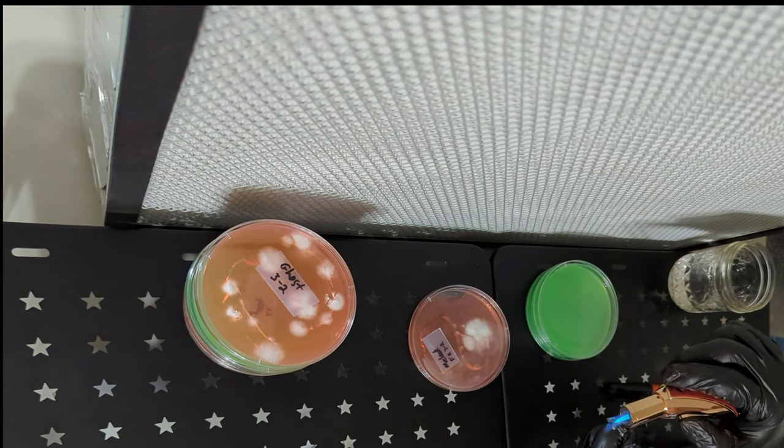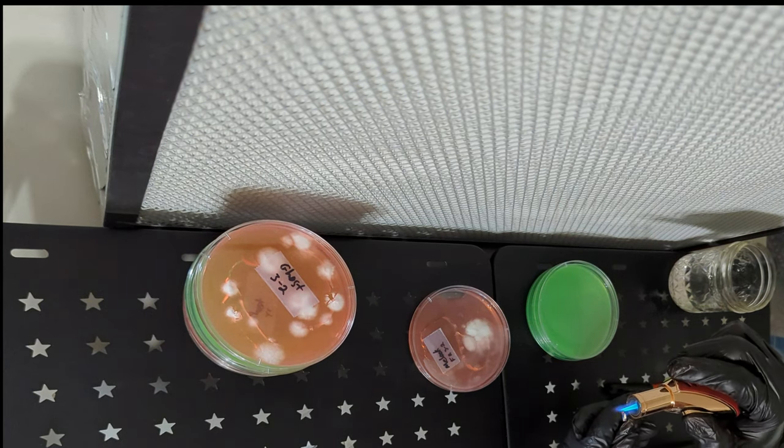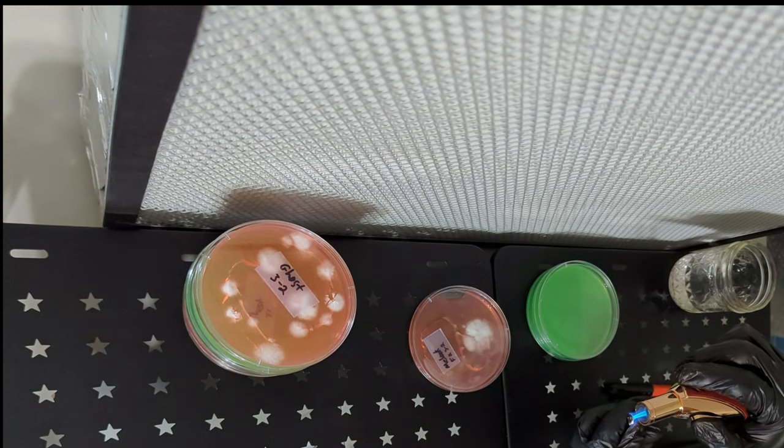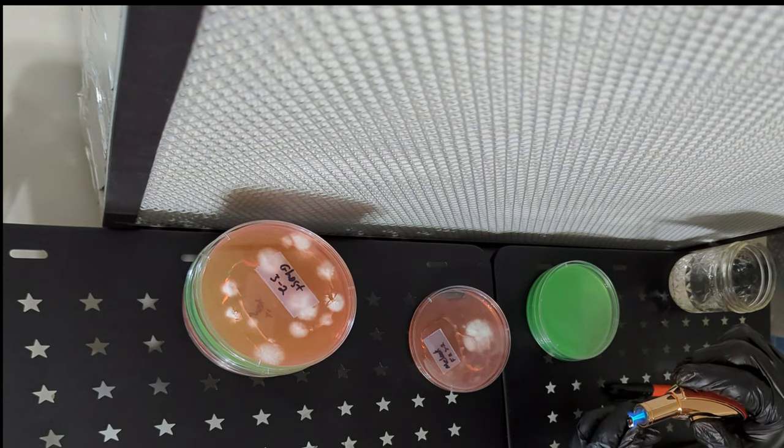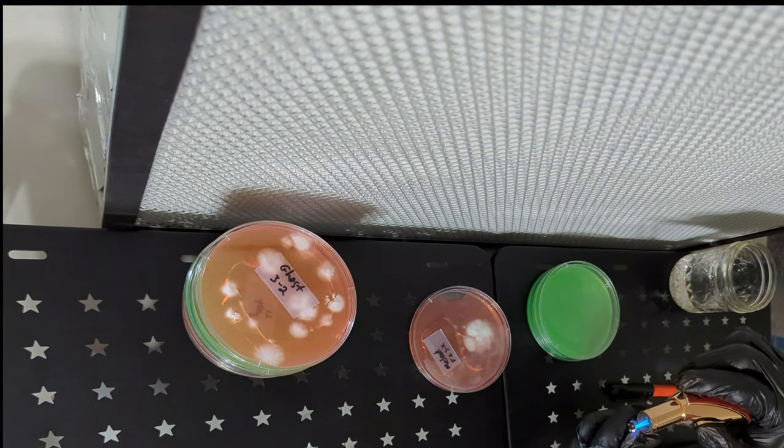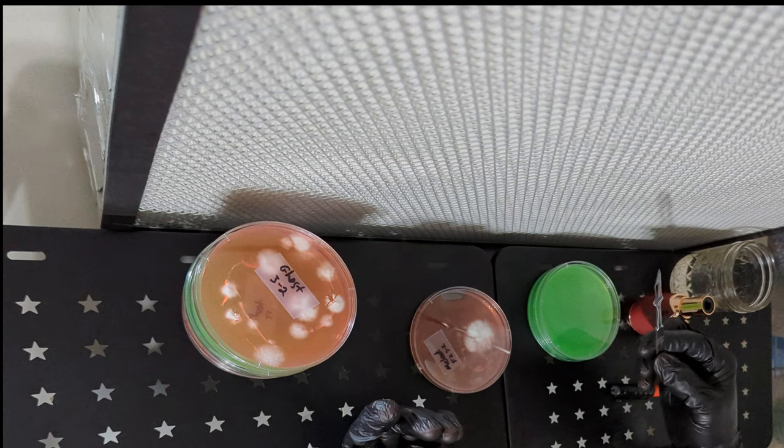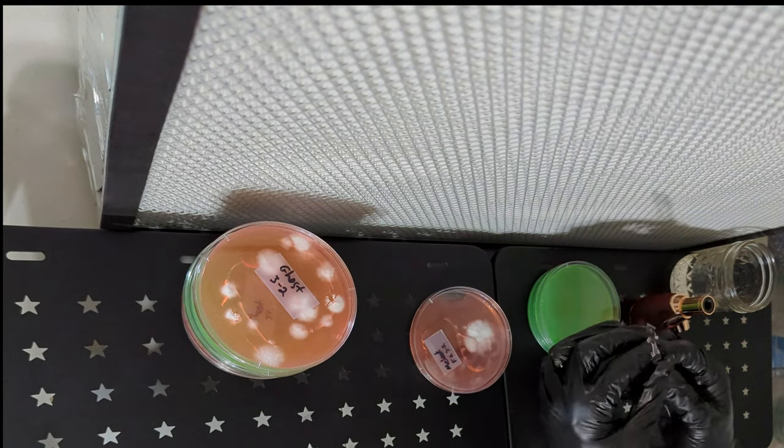When selecting mycelium for subculture, you want mycelium that is uniform in color and shape. Try to avoid anything that isn't white or doesn't have a consistent texture or look to it. Make sure it isn't scaly or powdery. All mycelium is cotton-like and should appear to be fibrous or filamentous. You will get a feel for it over time. It becomes somewhat of an intuition.